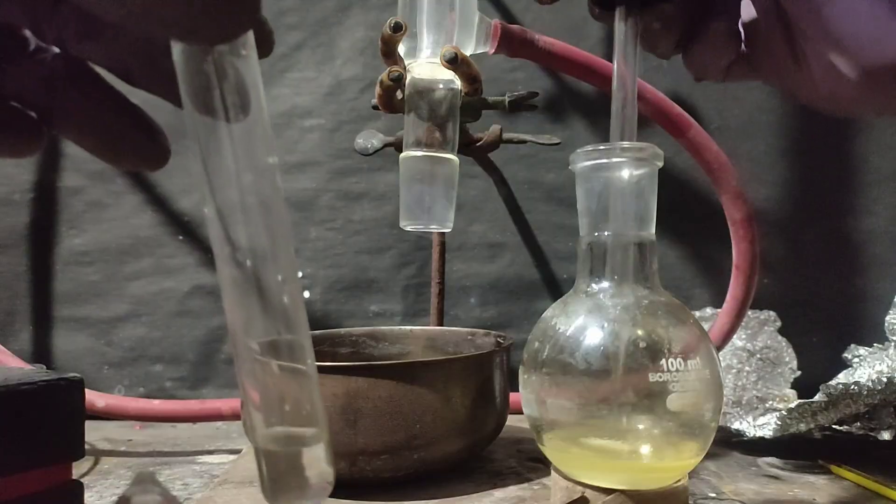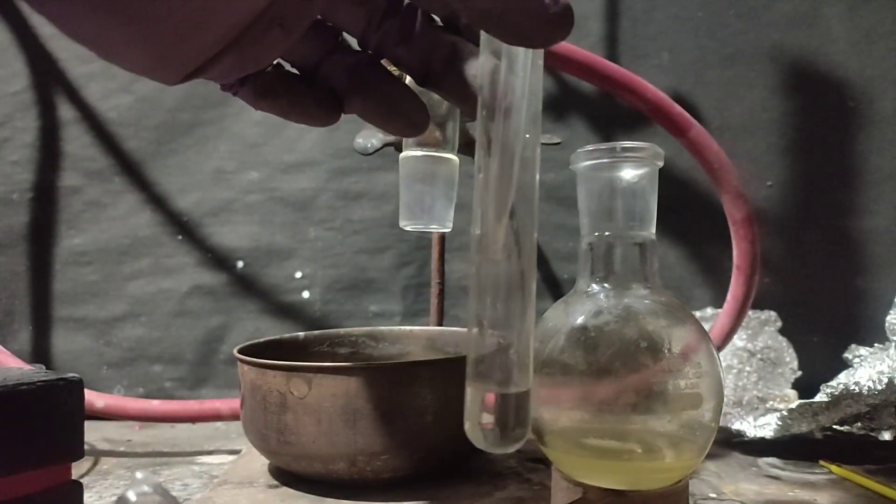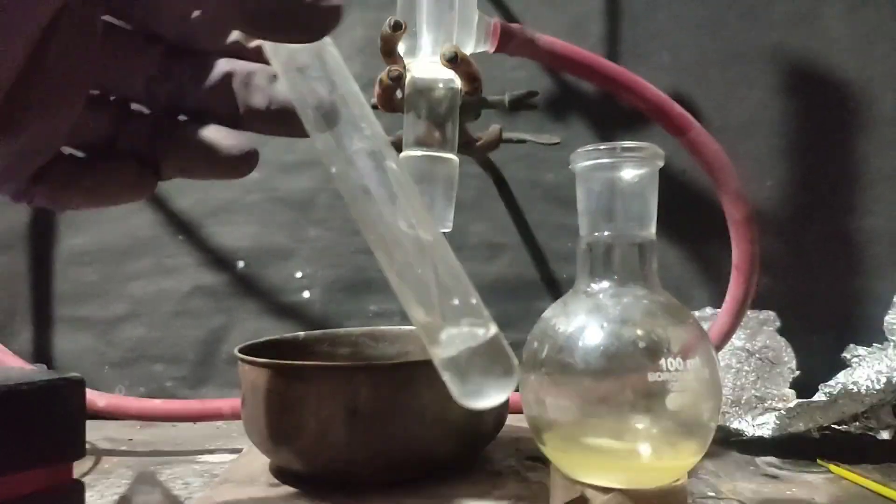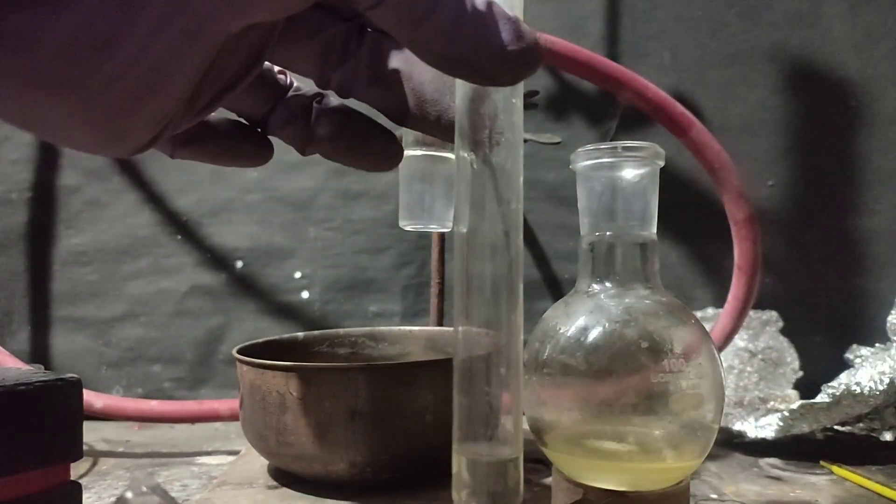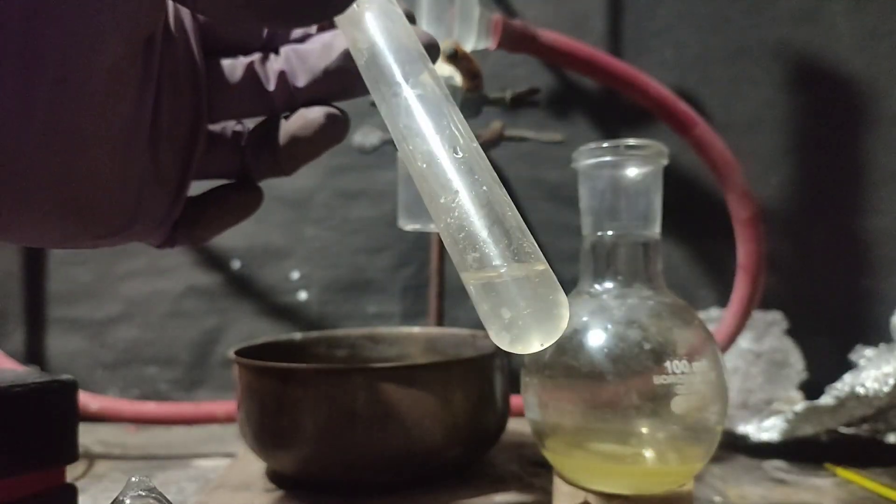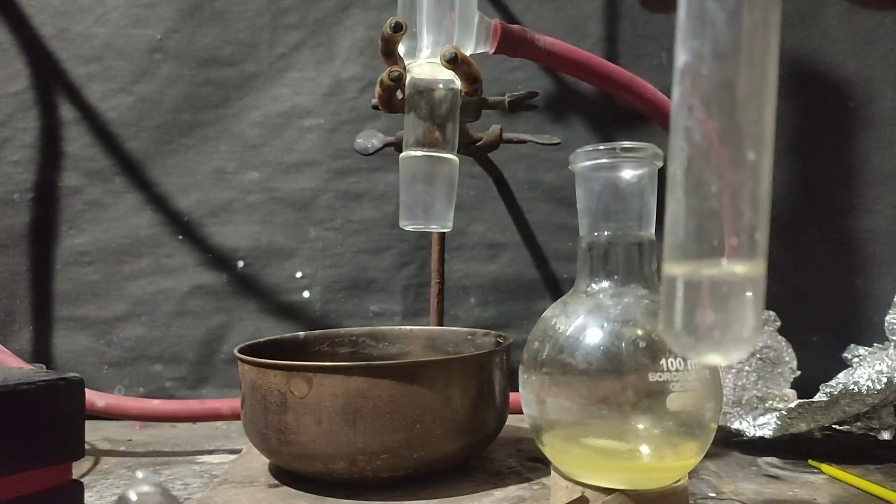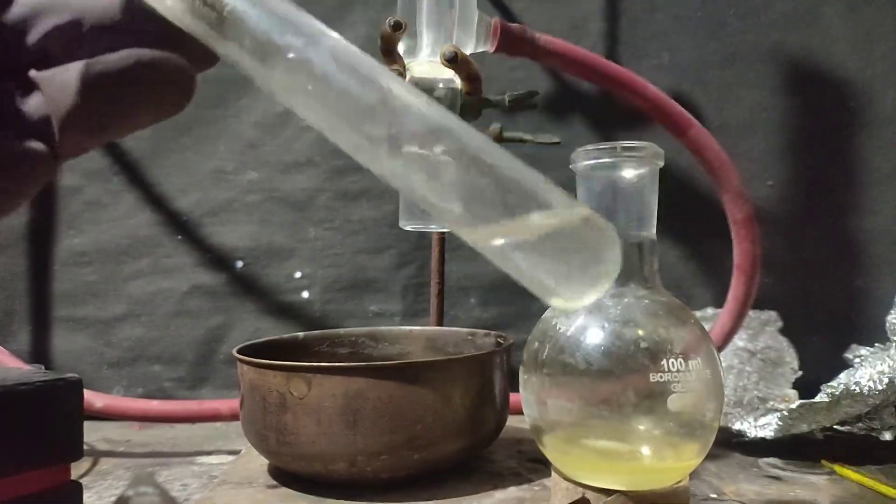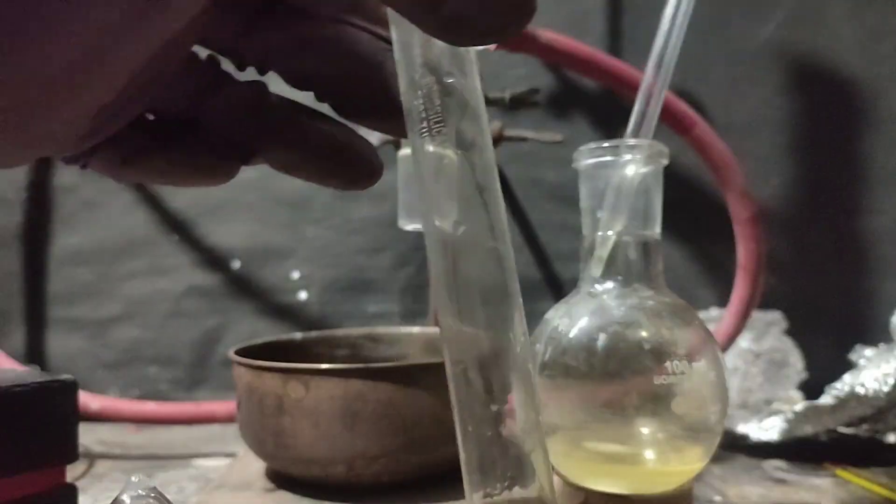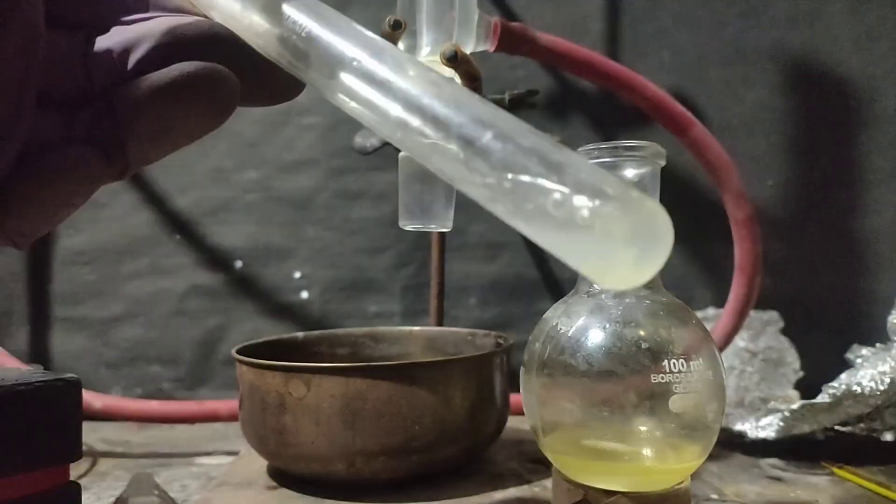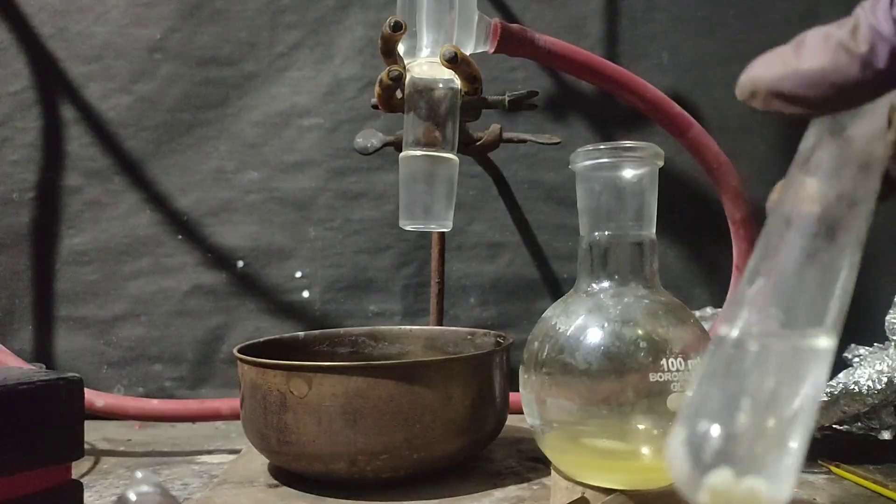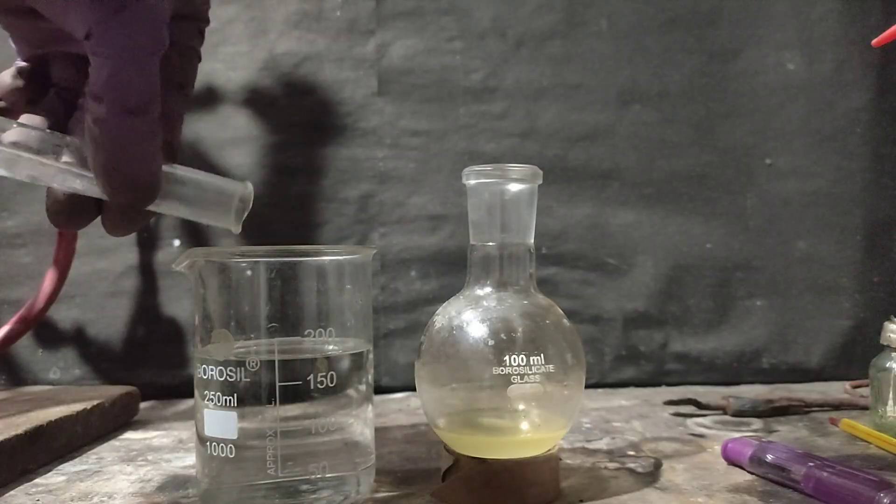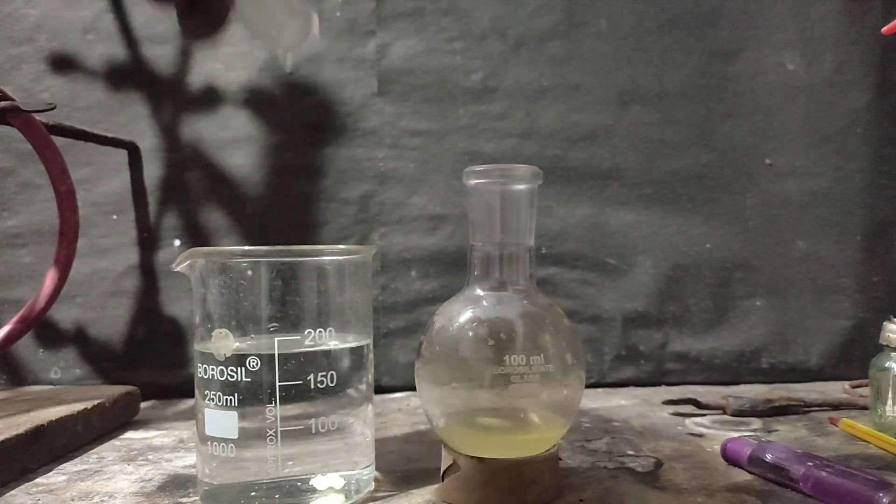After the reaction mixture cooled down, it had two layers: the upper organic layer and the lower acid layer. The melting point of 2,4-dinitrotoluene is 70 degrees Celsius so it should solidify, but it was still liquid. To check if we really made 2,4-dinitrotoluene, I added some drops of the organic layer into water. After shaking for a while, a white solid chunk formed, so I decided to do the workup.